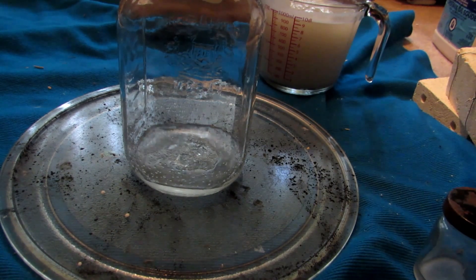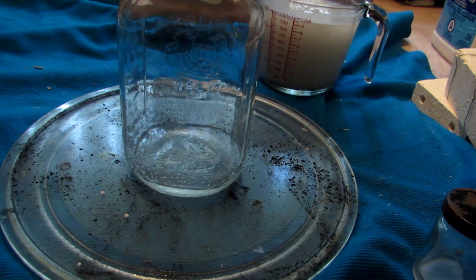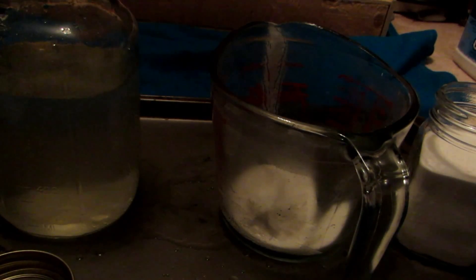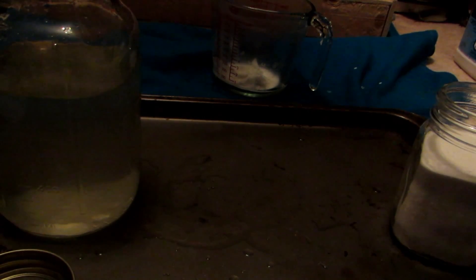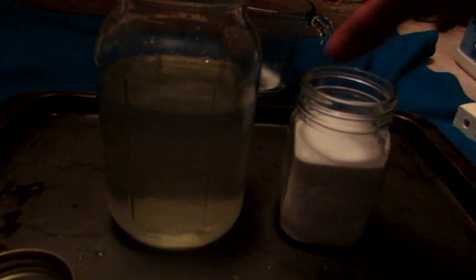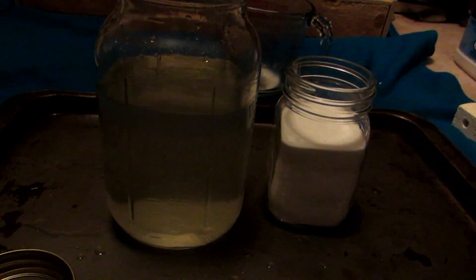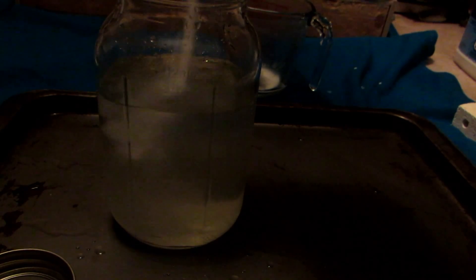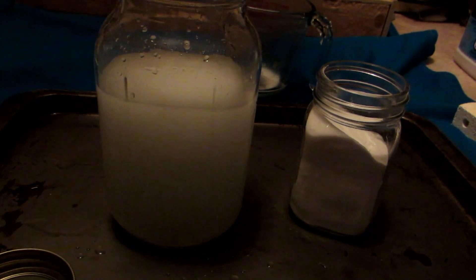In the meantime, we prepare about 395 grams of sodium bicarbonate, which is the baking soda. After filtering, we're left with a whole lot of anti-caking agent that we don't need. The filtered solution is quite clear. Here's the reaction: adding the sodium bicarbonate produces ammonium bicarbonate and sodium nitrate. We start adding the baking soda slowly but surely, using lots of stirring, and a fair amount of fizzing does occur.